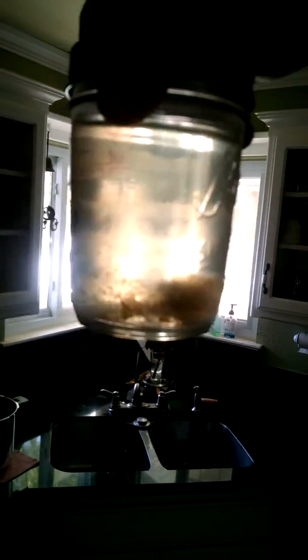None of that sediment or anything will have any effects whatsoever. Yeah, a lot of that sediment in there from the honey, but let's see if I can get the snot — as I like to call it. Some of the jar has perspiration on it also, so that's not really helping get a good look at it, but I believe it's in there, you can kinda see it. There's a lot of sediment in there, but it is what it is.